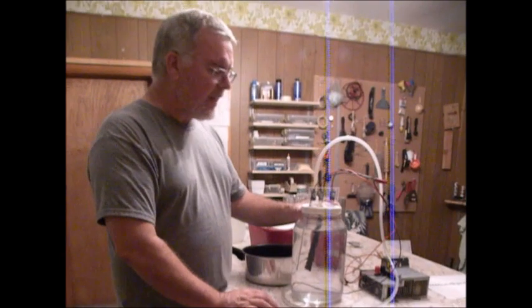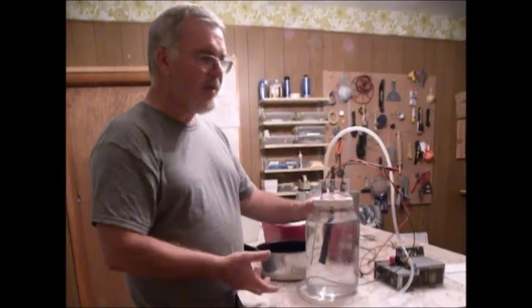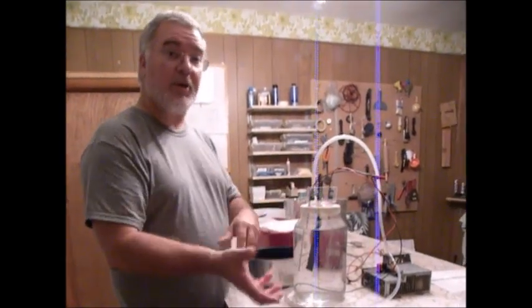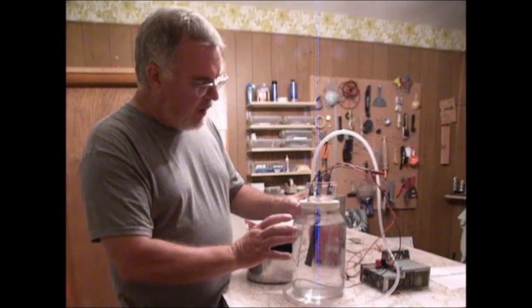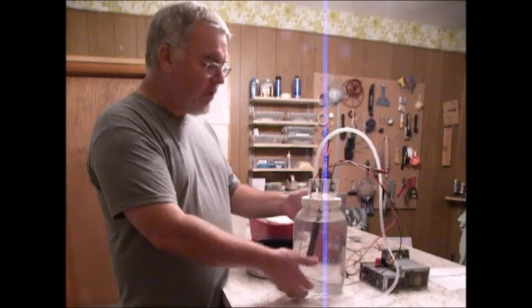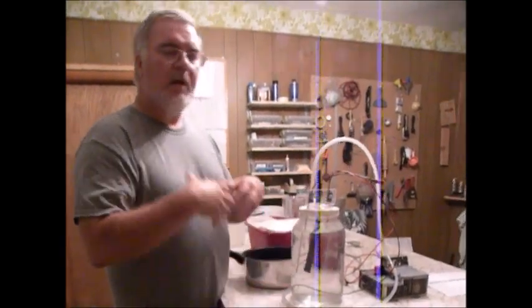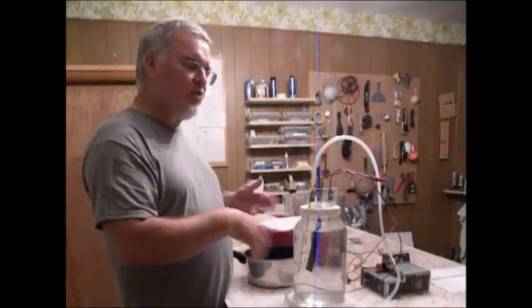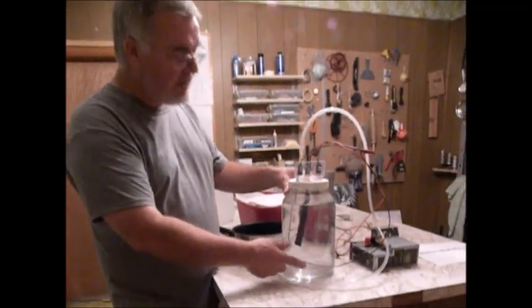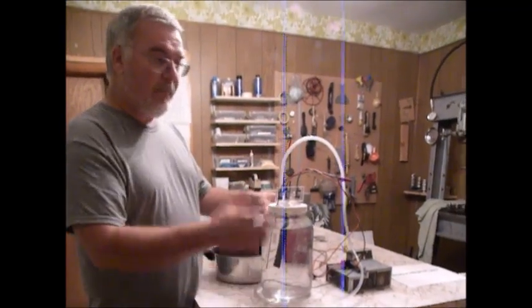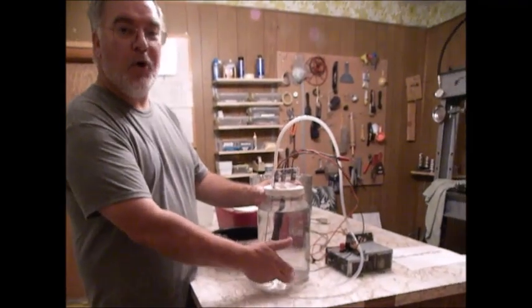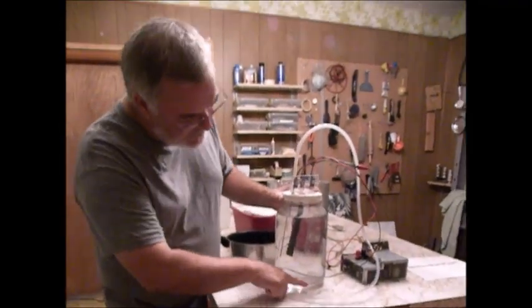Then I got lazy from running it, you know, for a couple months, and I was just guessing. And I realized that I wasn't getting enough salt concentration in there because my production went down. So what I did at that point to get back to a proper level, I would take my solution after it had been filtered out, bring it to a boil, and I kept dissolving salt into it and let it cool in a jar until I started getting crystals in the bottom. First couple times I did it on the one cell, I probably put in 300 grams of chloride and I still got no salt crystals in the bottom.